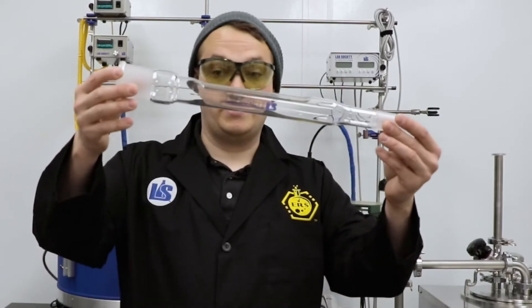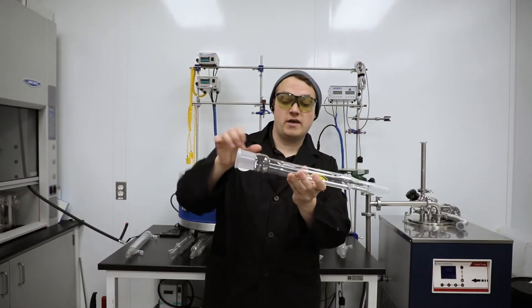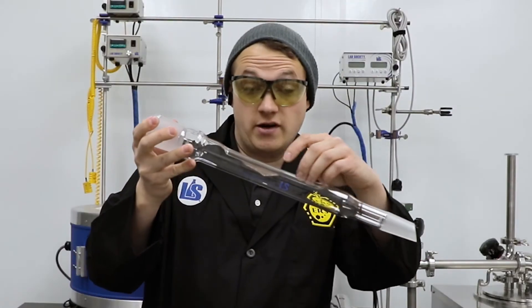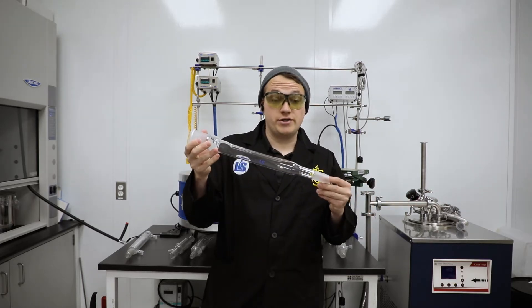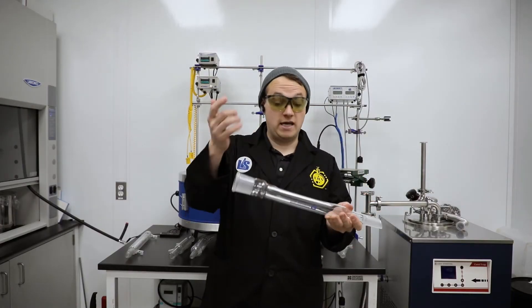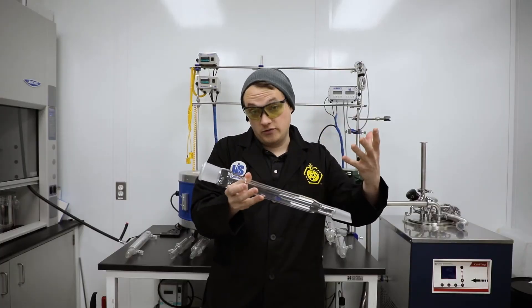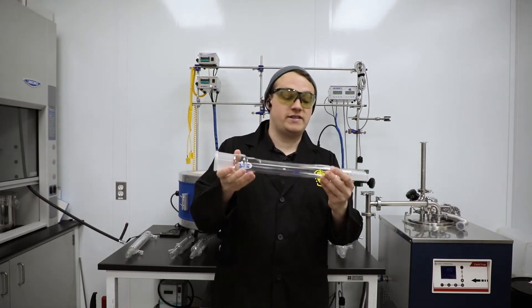Another type of Liebig is the jacketless condenser, or realistically just a tube of glass. It's got a thermocouple trough in it so that if you want to use our hot condenser mantle and stick your thermocouple in the well, you can detect the temperature of the outside of the glass. It also adds a little bit of surface area to the inside. These condensers are really cool because you don't need to flow a liquid through them. They work very well for hemp operations — THC, good for first pass. You're just using the temperature of the vapor condensing as your heat transfer, and it's not vacuum jacketed so it's going to increase condensation more so than the vacuum jacketed one, but it'll stay quite hot.